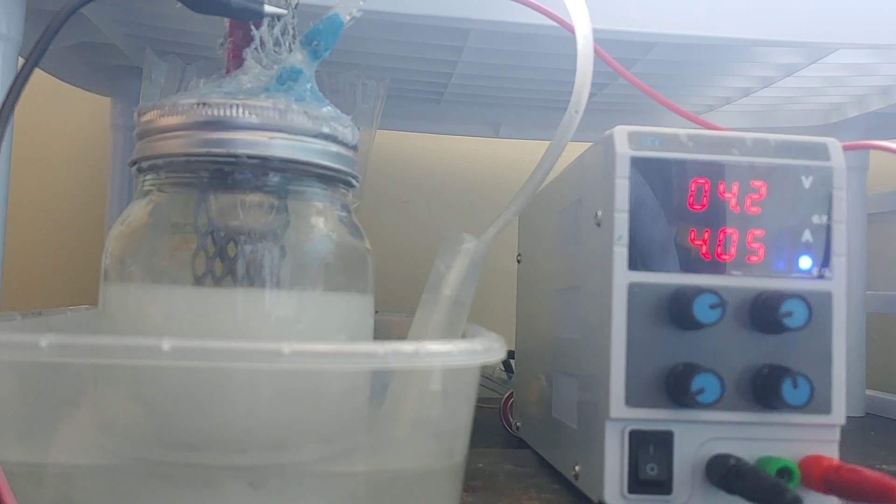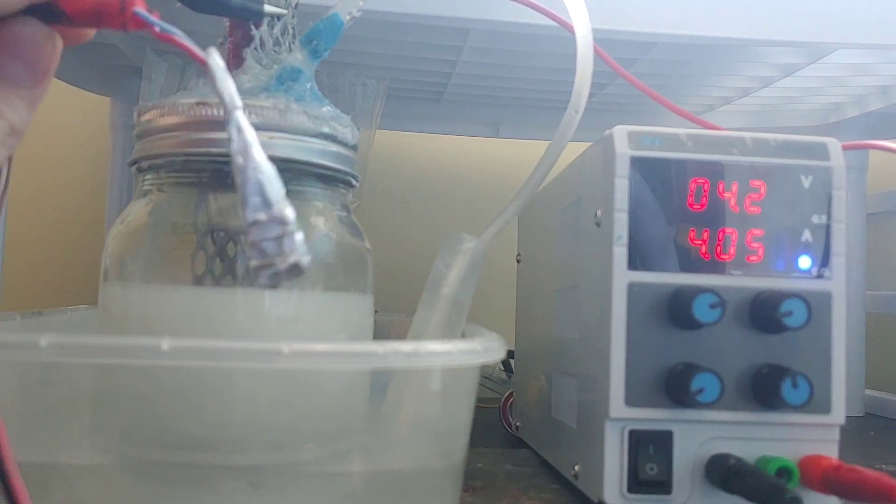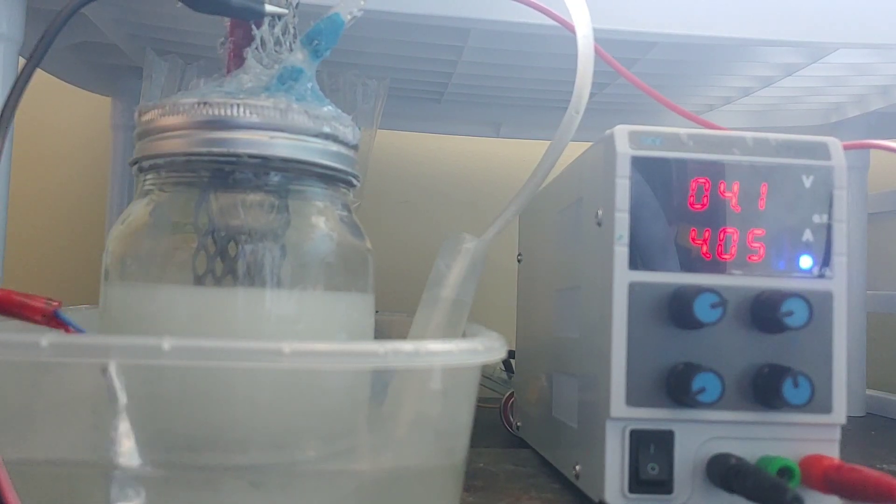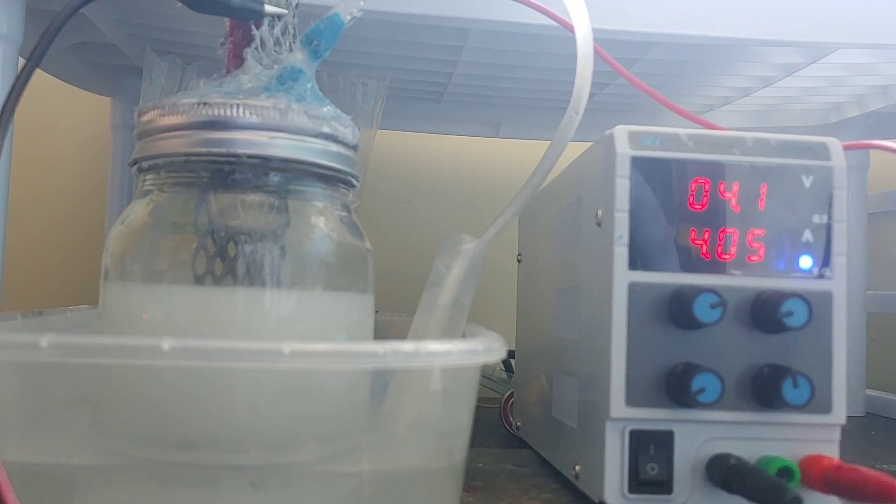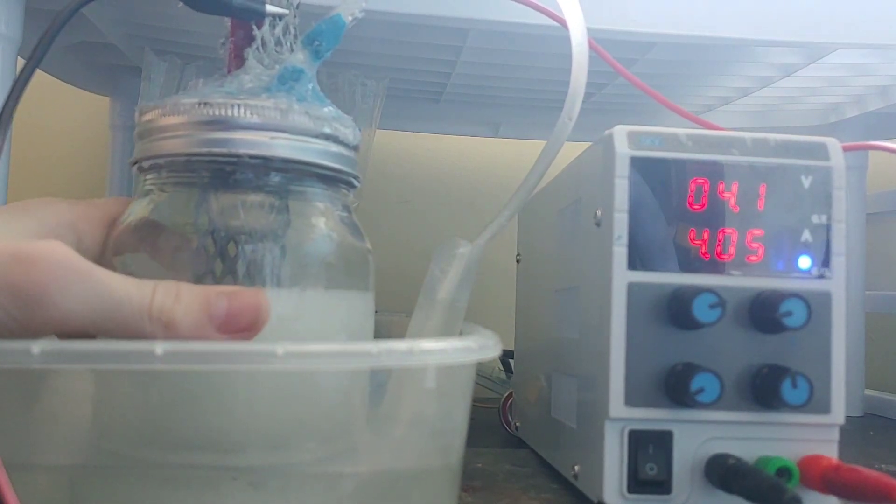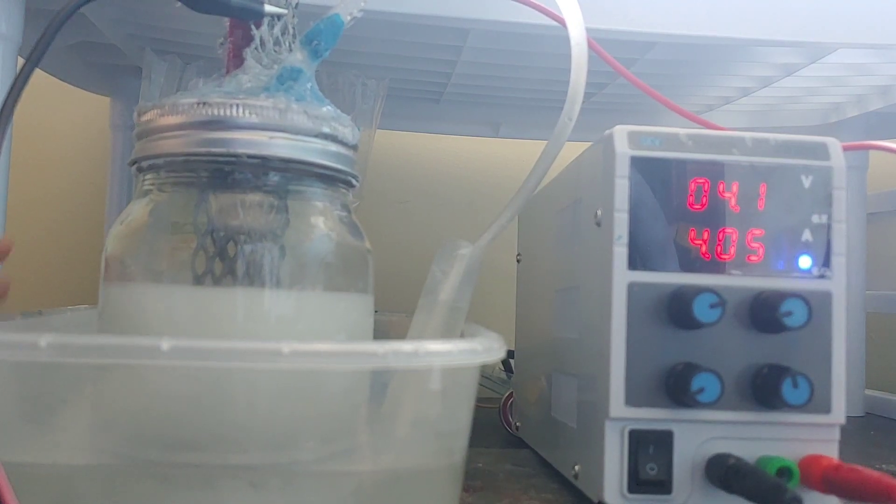I knew why, I just forgot while making the video. So you'll have to excuse me on that. And I have this little heating element from a hot glue gun that I just stick in here to help with the heating. In case you're wondering, no. It doesn't shorten—there's no—it's insulated. It doesn't shorten the water. Don't worry. Plus, this is directly tap water. There's nothing in there. Unless I spilled some sodium hydroxide solution from here, which might have happened. But yeah, and the reason I have this is mainly because, yes, this cell does get hot. But if I turn it off to do some quick adjustments, I don't want to have to wait for it to heat up again to get prime efficiency. So this hot water really just helps heat from the inside and the outside to get it hot always.